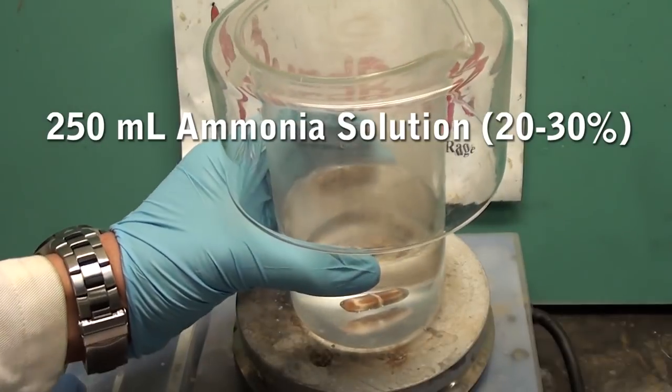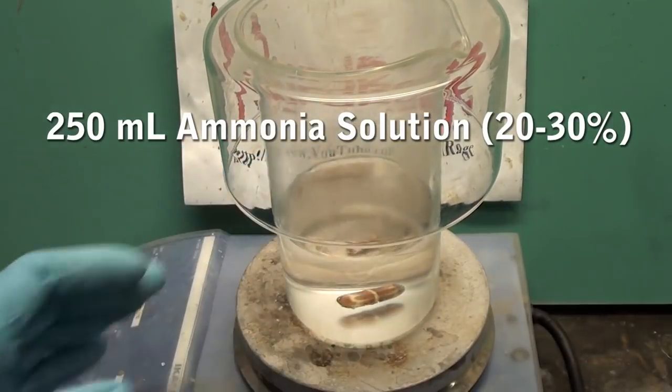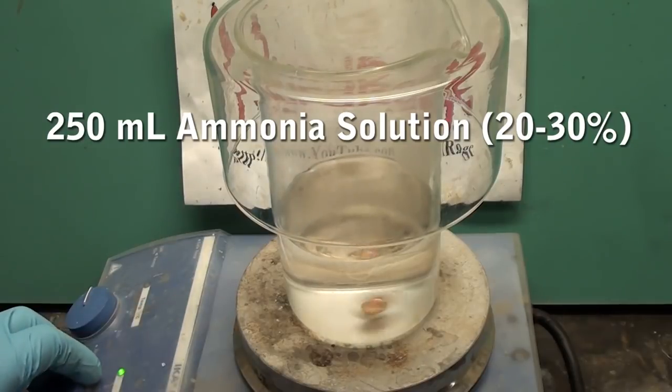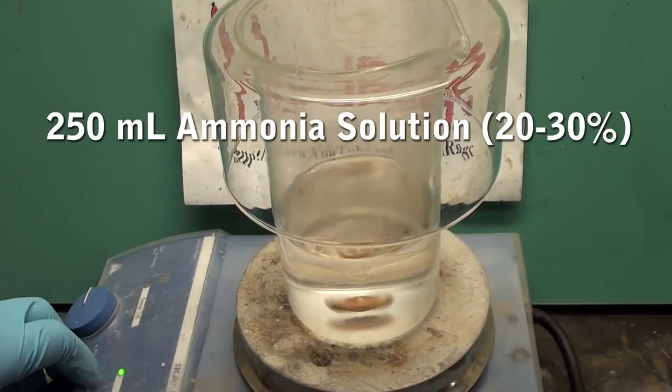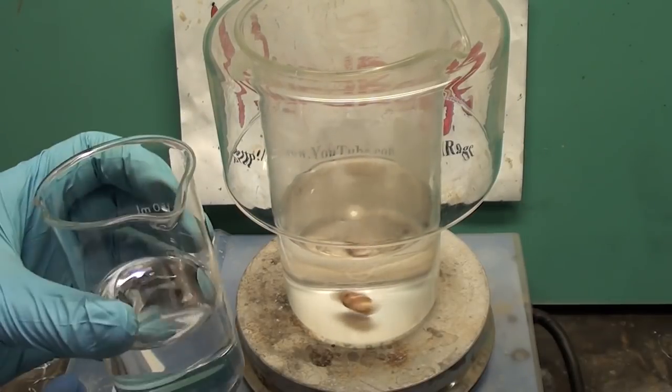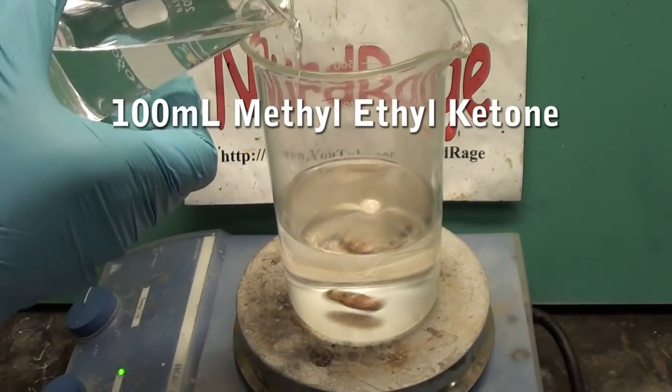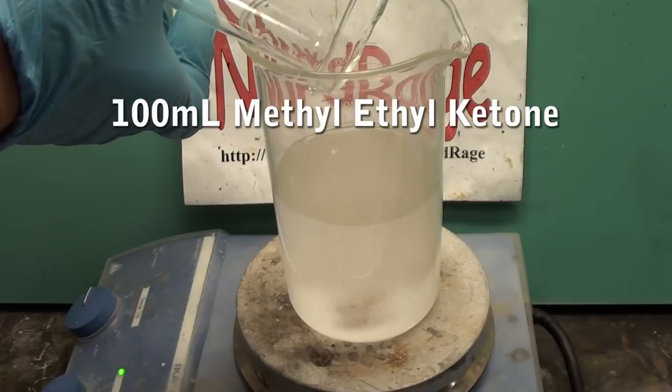First we start with 250mL of concentrated ammonia solution. I'm using a 30% solution but this will also work with lower concentrations at the cost of some yield. Now add directly to it 100mL of methyl ethyl ketone. This is available in hardware stores as a cleaning solvent.